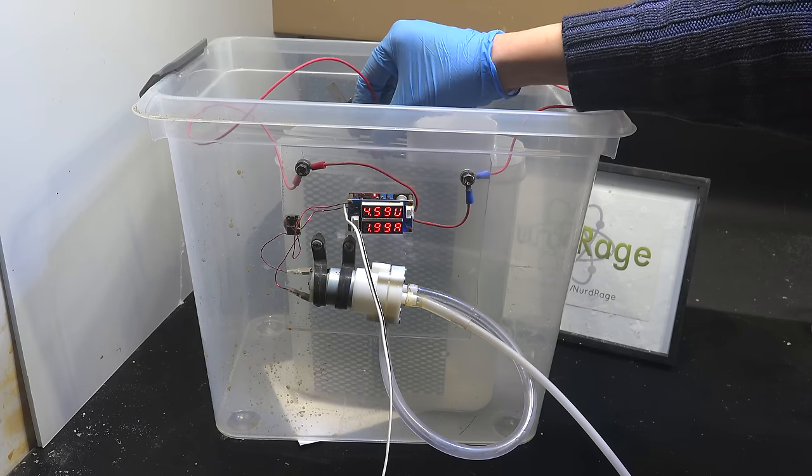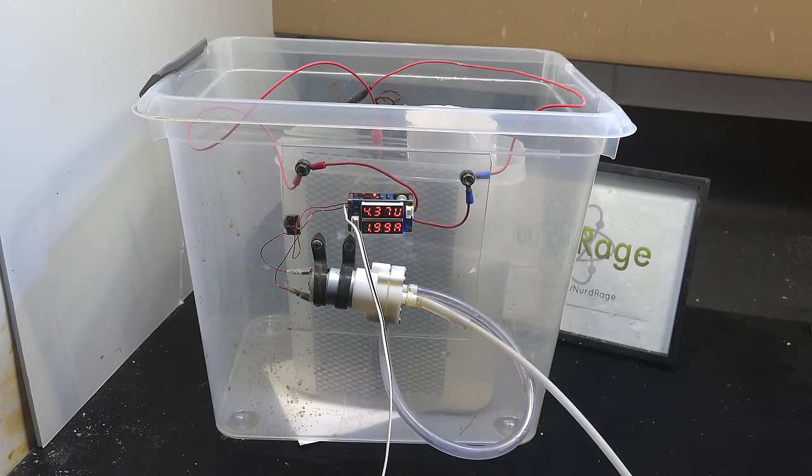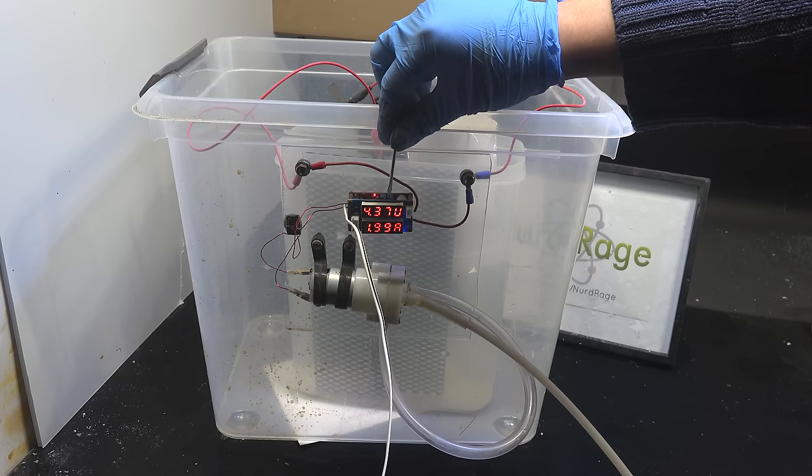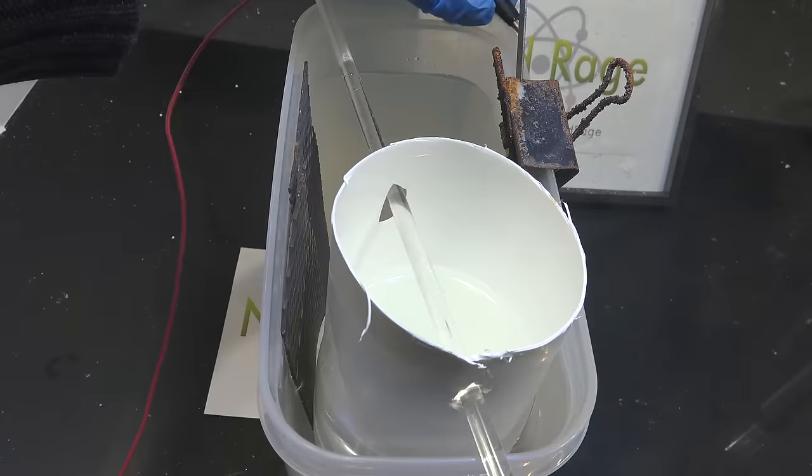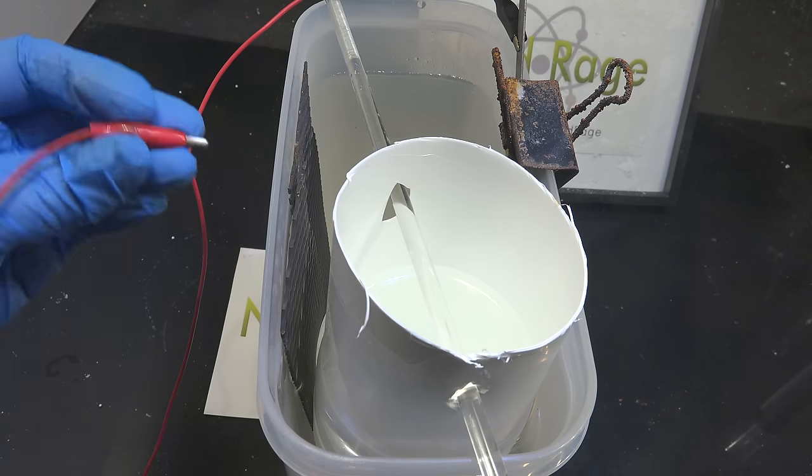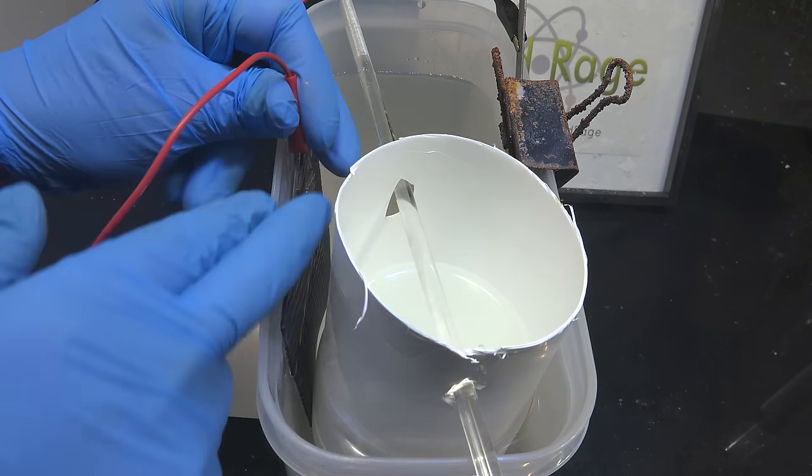Let me attach the wires. I'm setting my current to 2 amps. Now these electrodes can take much more current, several tens of amps, but I'm using 2 amps for a couple of reasons. One, the point of contact is just one clip and this is generally high resistance resulting in excessive heating here. Excessive heating will damage the coating on the electrode.